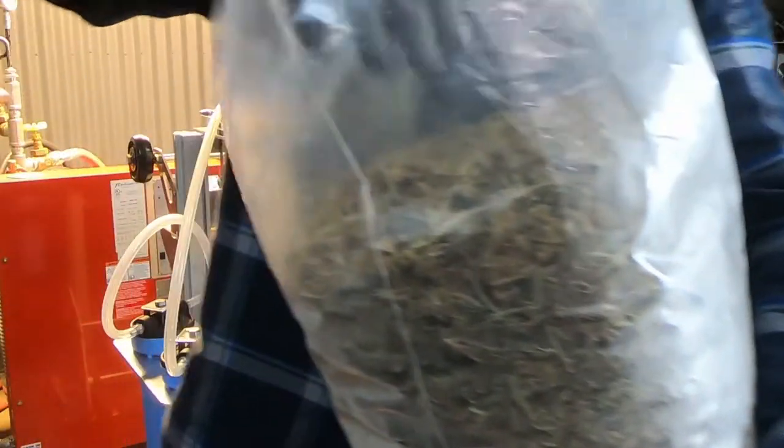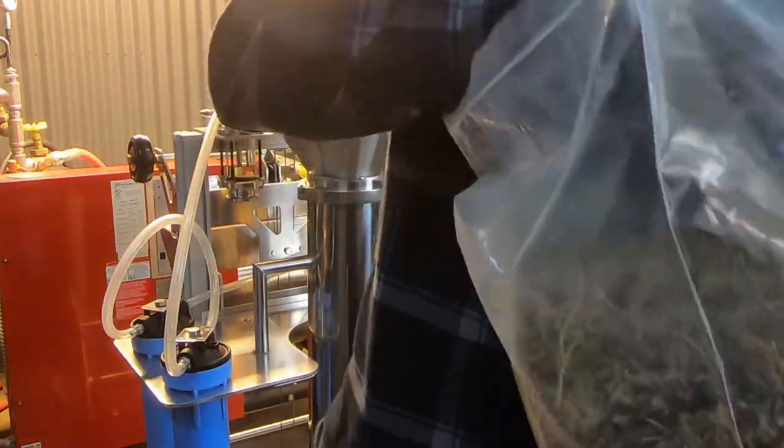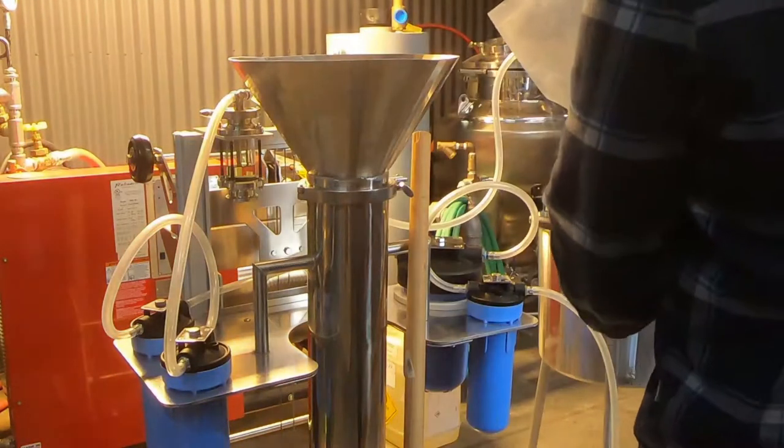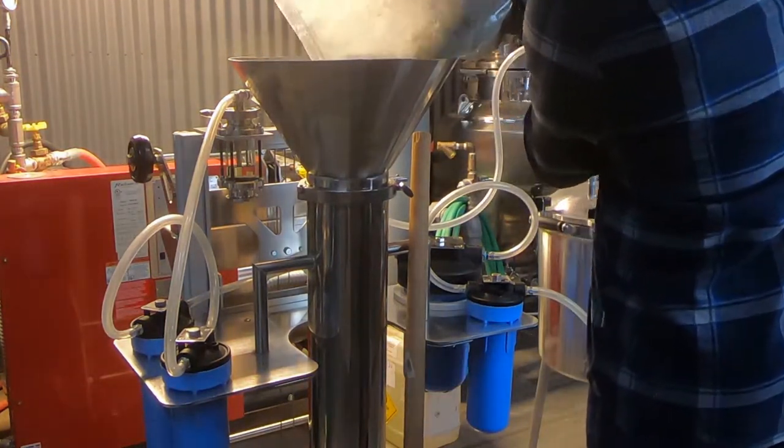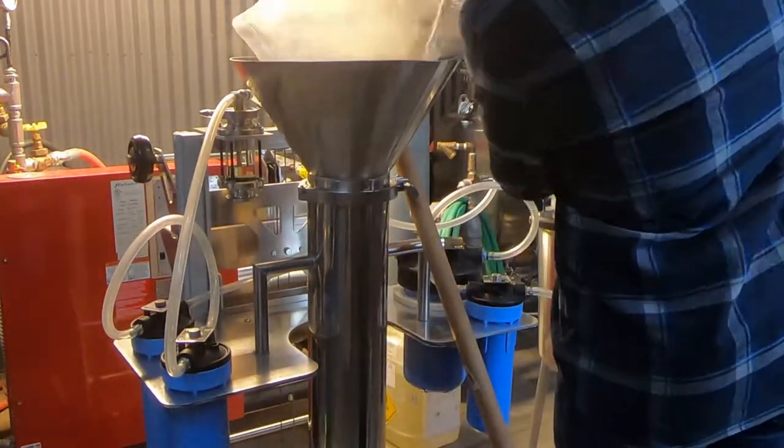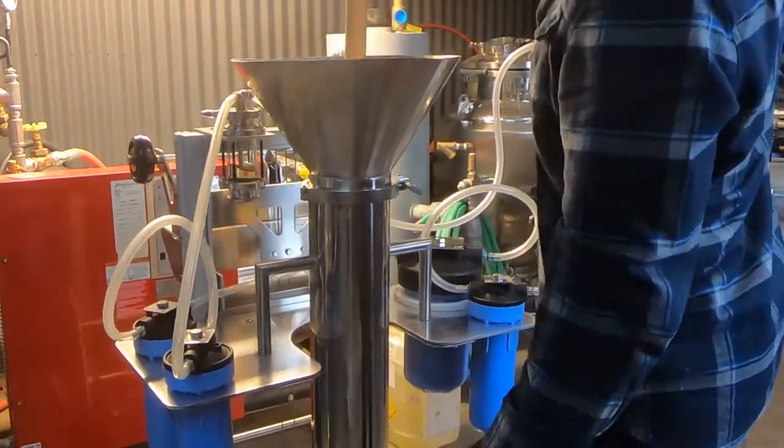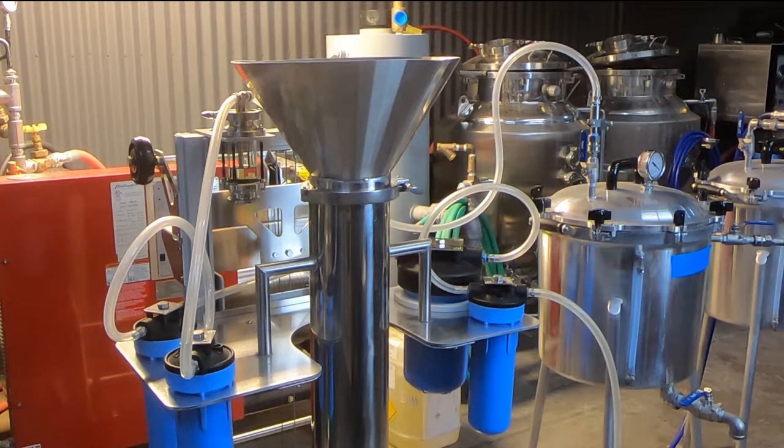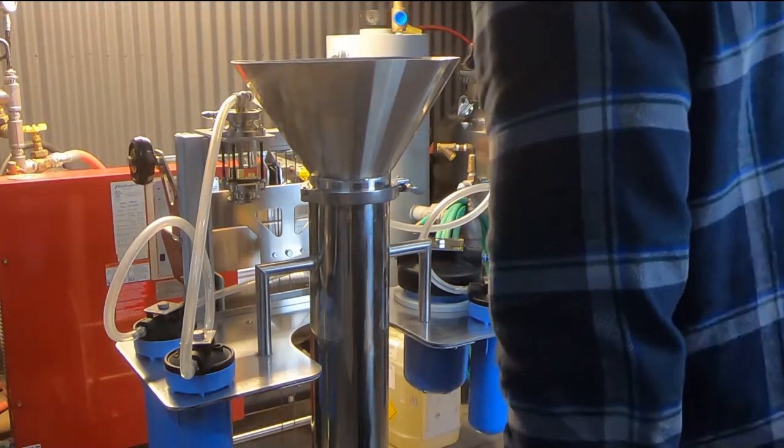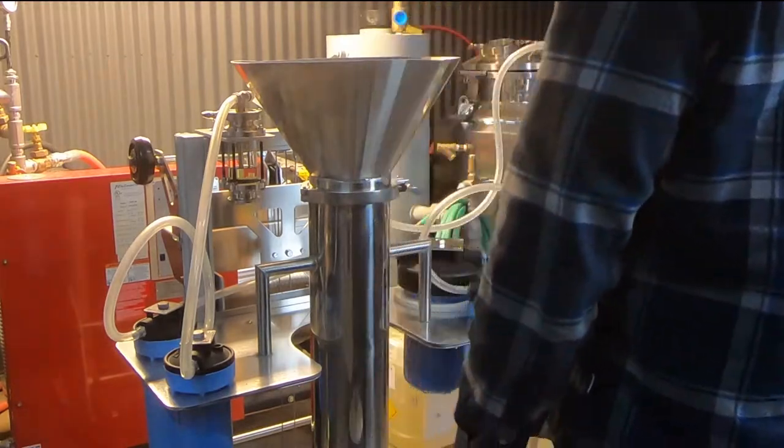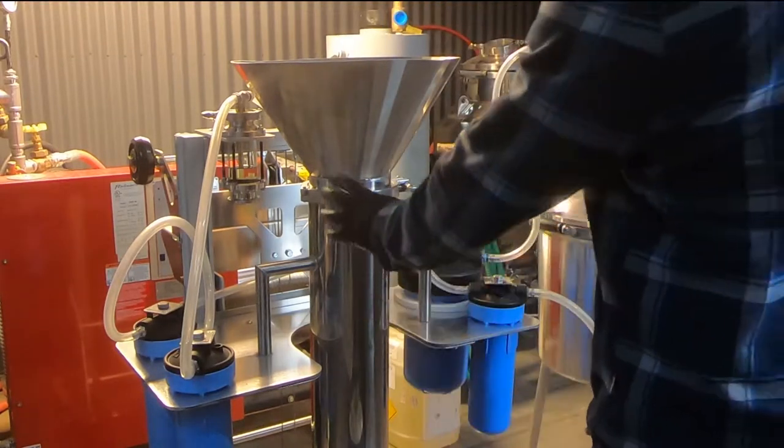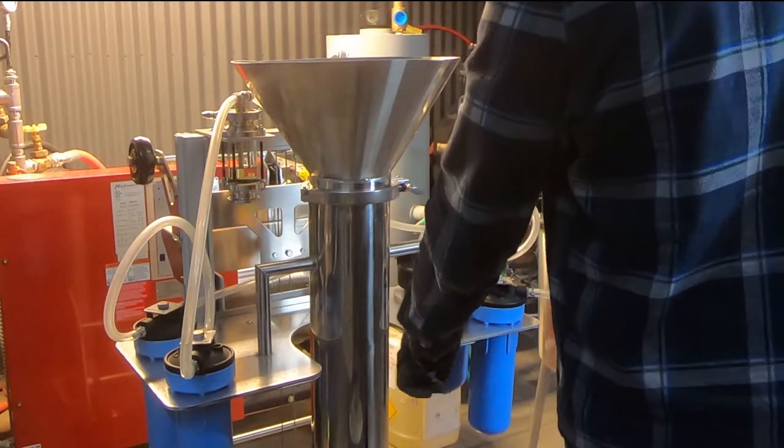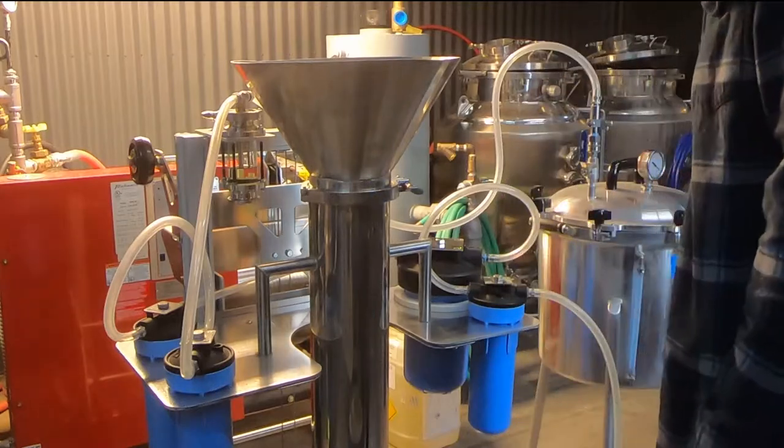I've got five pounds of material here. Now that we got our column packed, we're going to turn our pump on and we're going to pull the liquid nitrogen through the column to winterize the material. Then we'll get our alcohol and we'll do that as well.